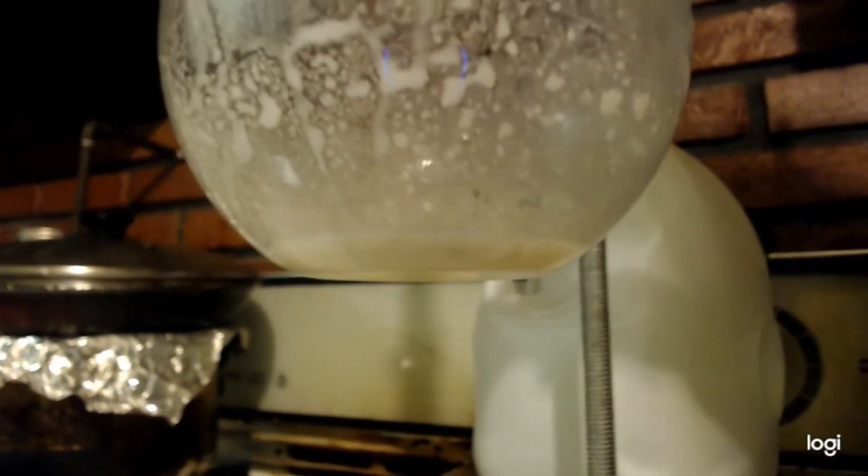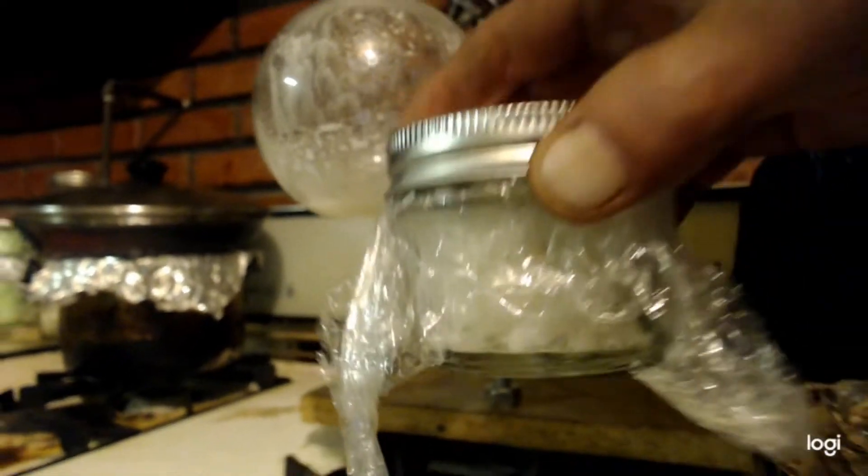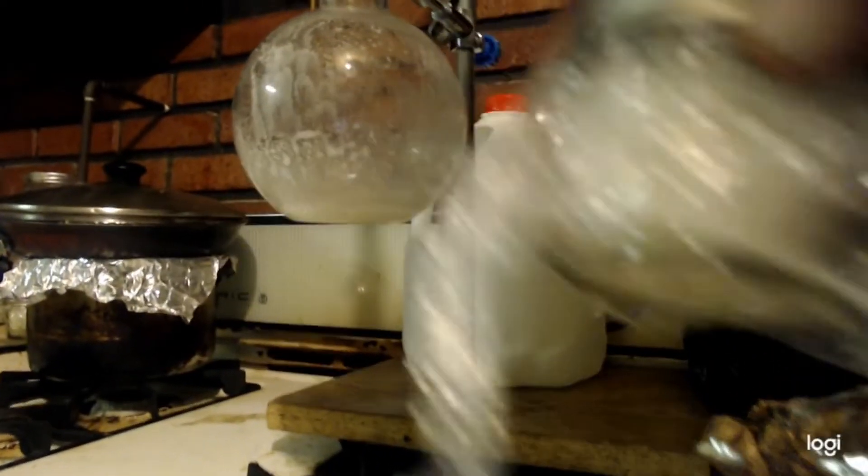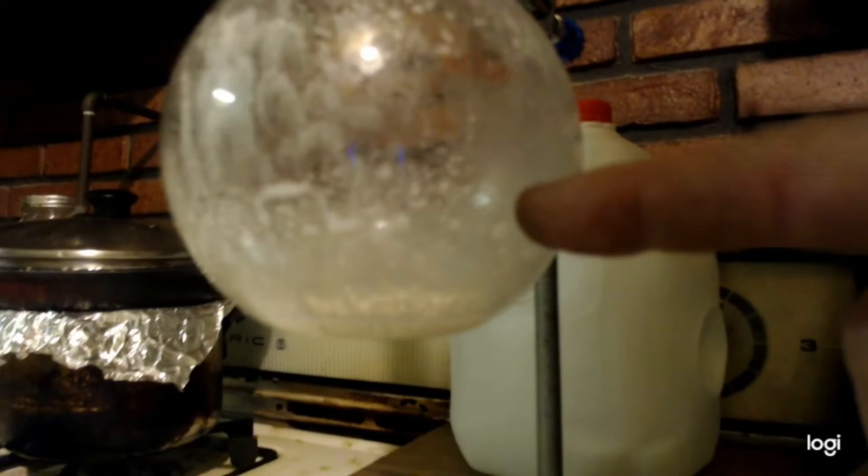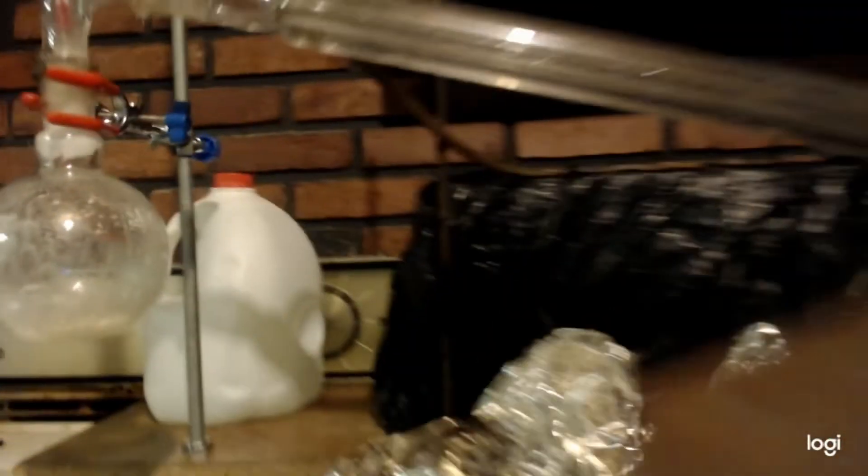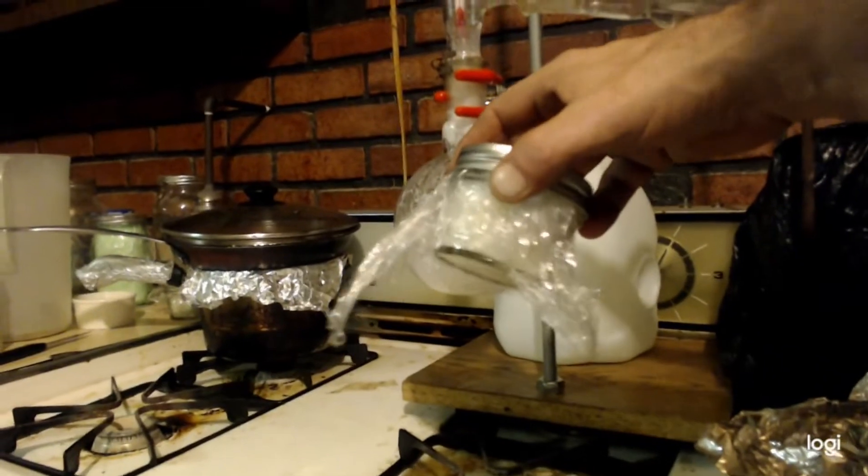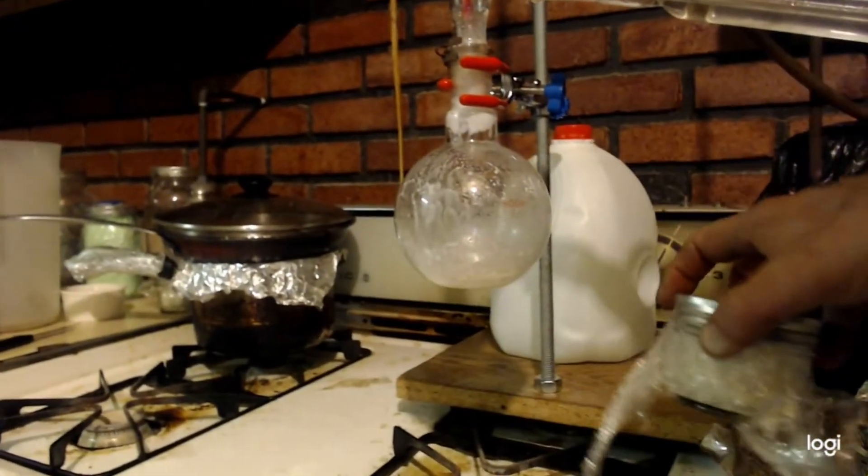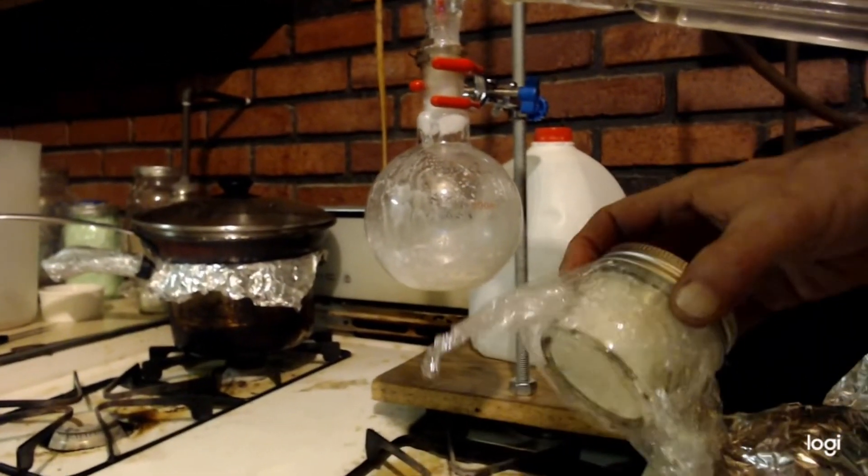Okay, now I want to get my methylamine, all that stuff I got, and put it in with this. Then put the vacuum back on. This is set up for a distillation. Got my vacuum on it. I'm just going to put a vacuum on it and try and get as much water. I want it to be as dry as that. All of it is dry.